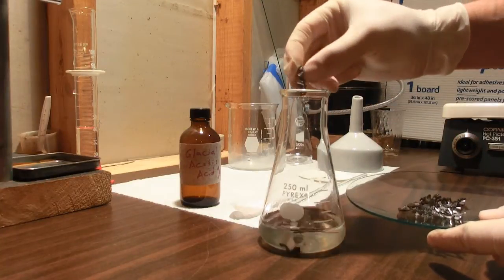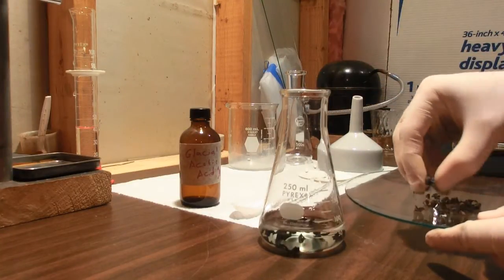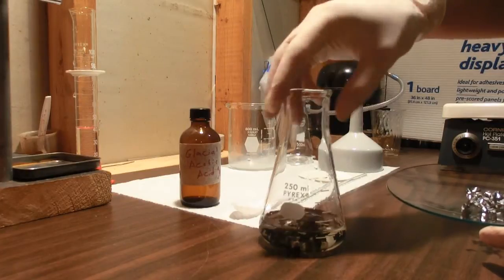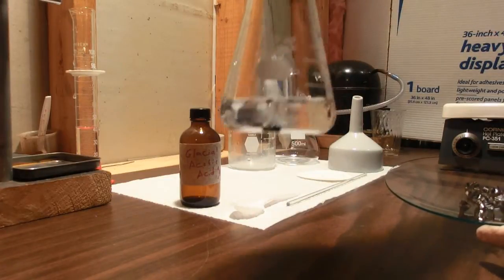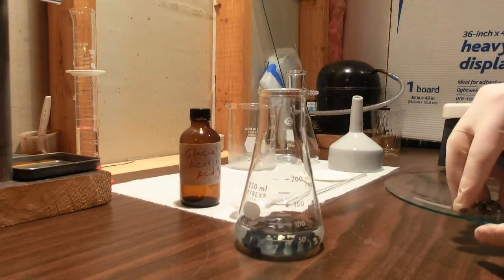Get a little swirl and now we can add the lead. I made this lead on the drill press with a drill bit. You can see the lead instantly turns to a dark color.